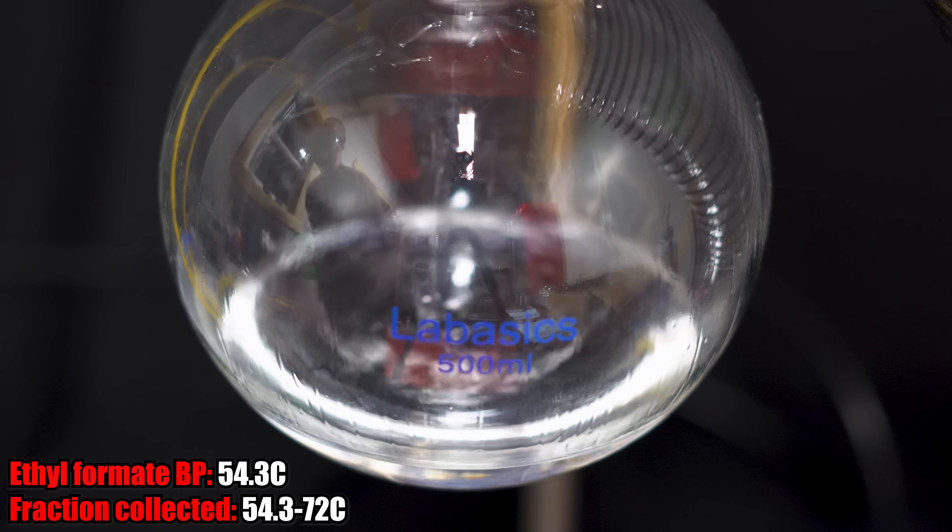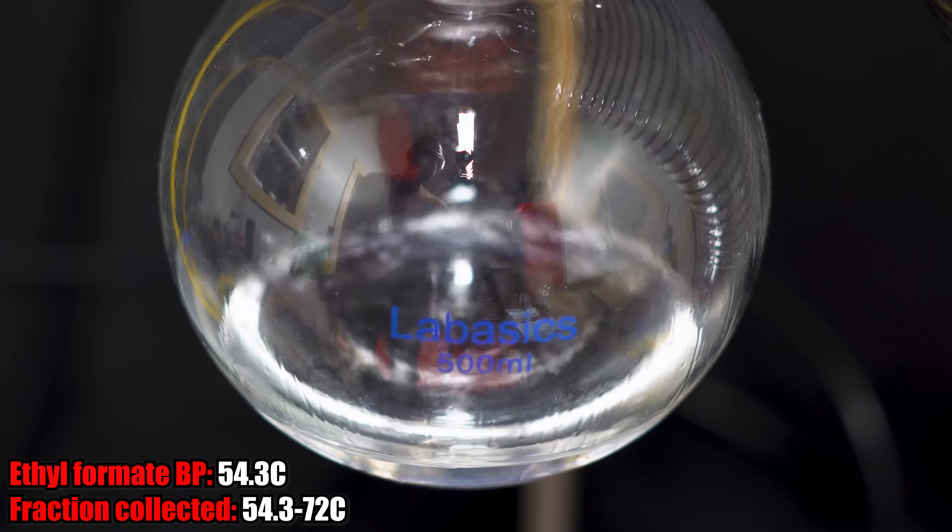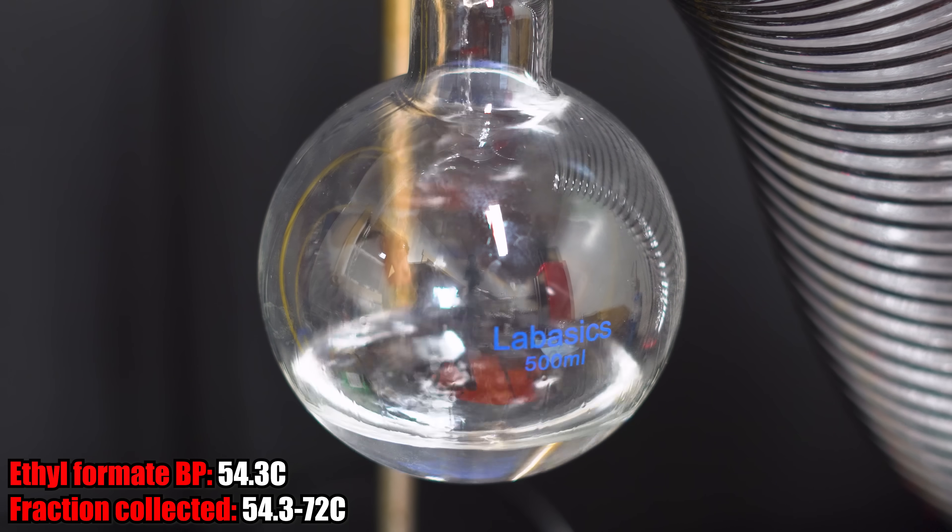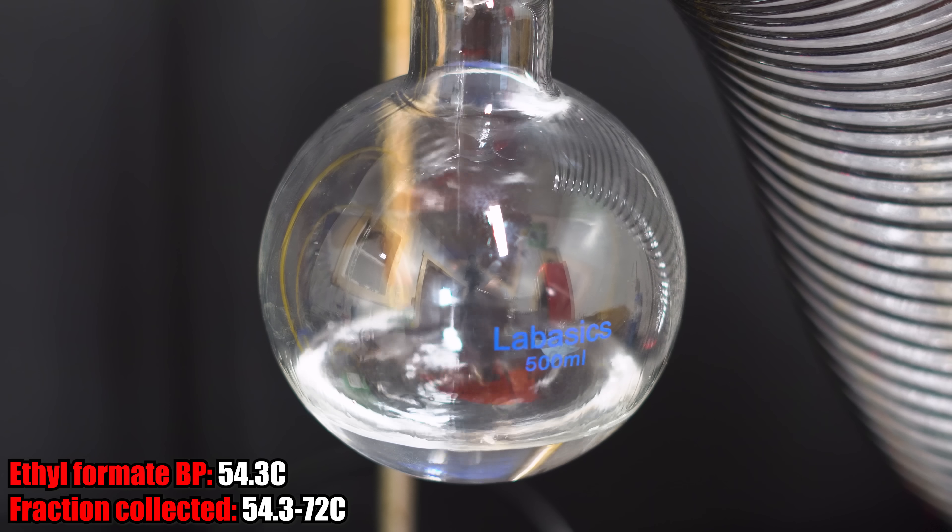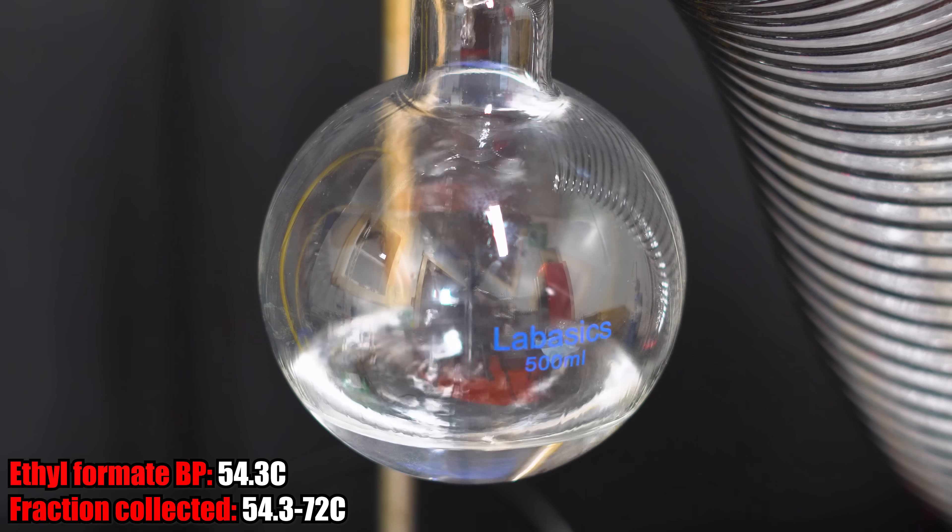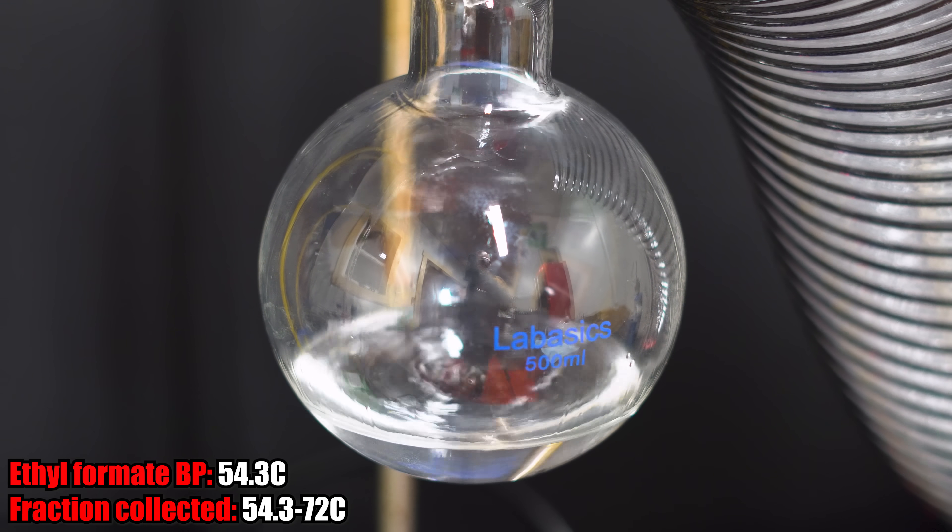I assume what's happening is something called boiling point elevation, and that's when the boiling point of a liquid increases because something else, like salts or another solvent, is dissolved in it. Basically, when you mix two things together, the mixture boils at a higher temperature than the pure liquid by itself.